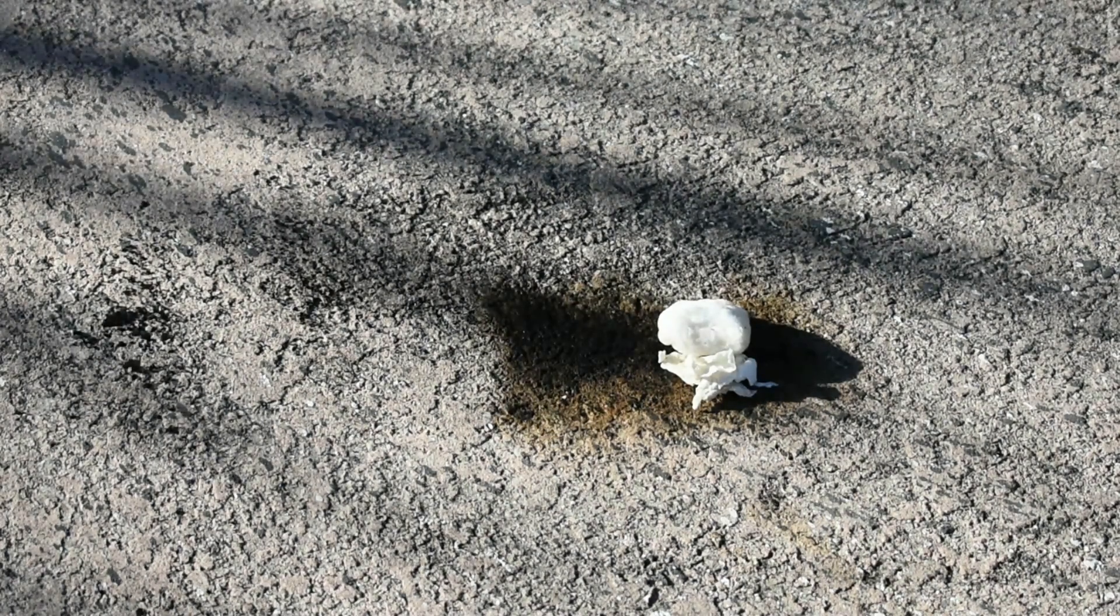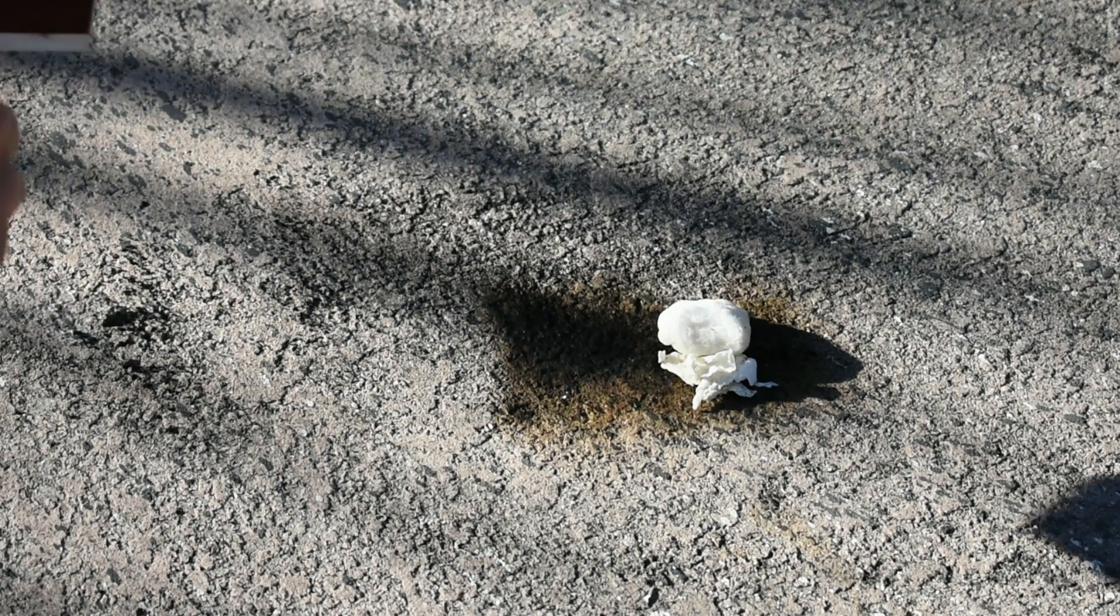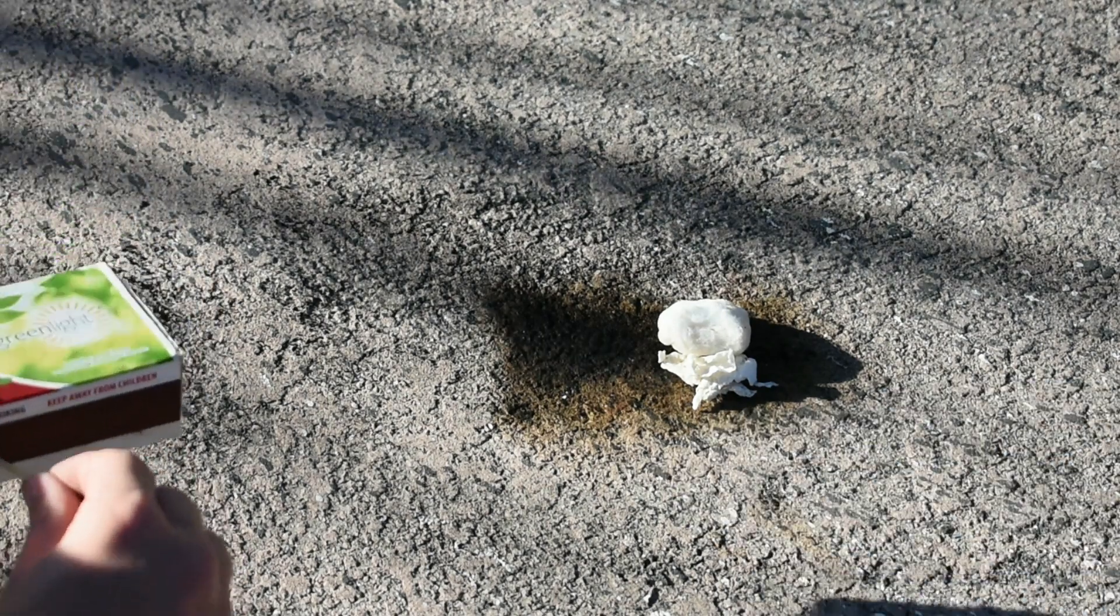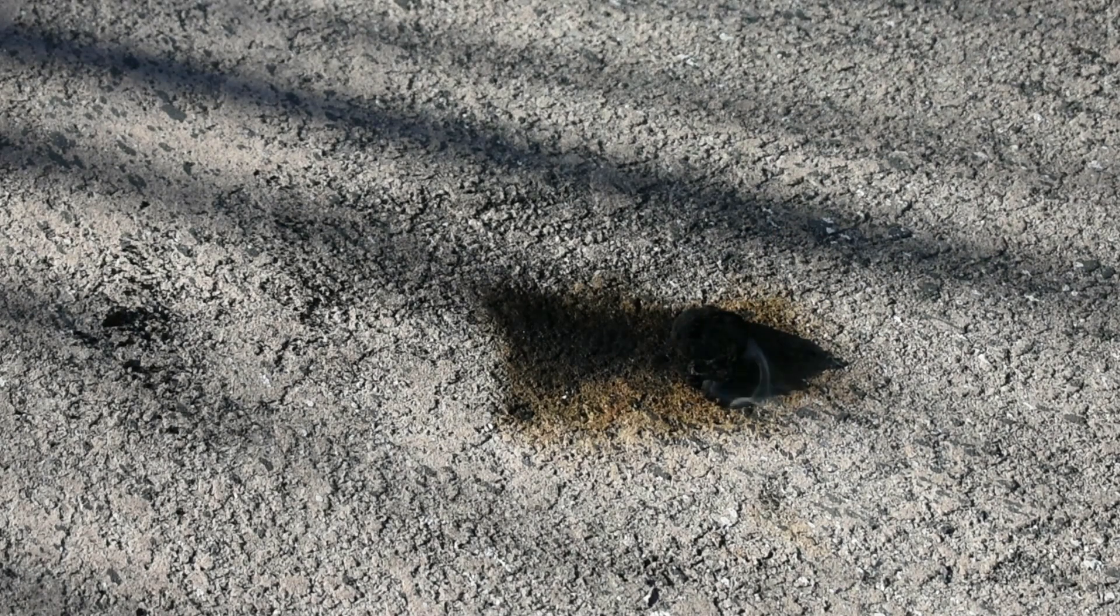I've got sort of a grand finale set up here. I just got all the little small pieces and the last cotton ball, and we'll see how this burns. There we go.